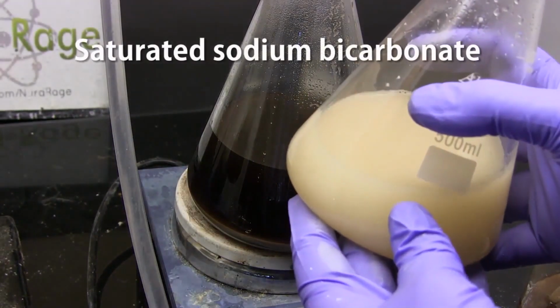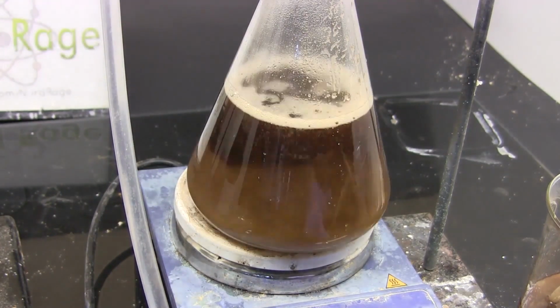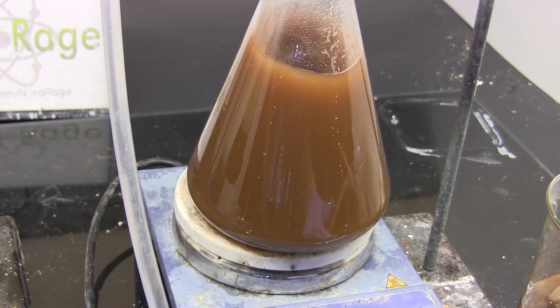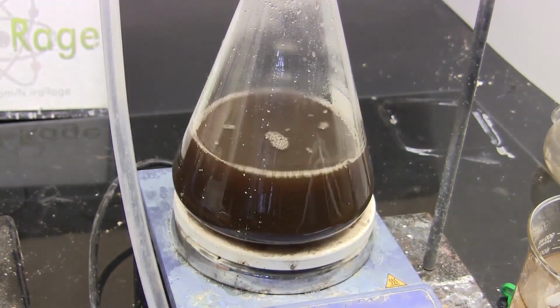At this point, we now add a saturated solution of sodium bicarbonate. The amount you should add should bring the total solution volume to 1 liter again. What we're doing here is using the alkaline sodium bicarbonate to react away any remaining hydrogen chloride. Now once again we remove the aqueous layer by siphoning. And here we are, our washed mixture of crude chlorotoluenes, byproducts, and unreacted toluene.